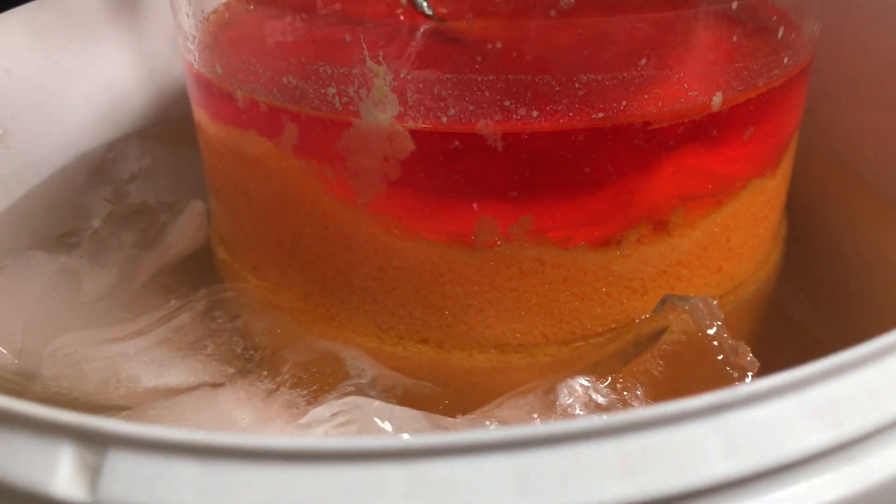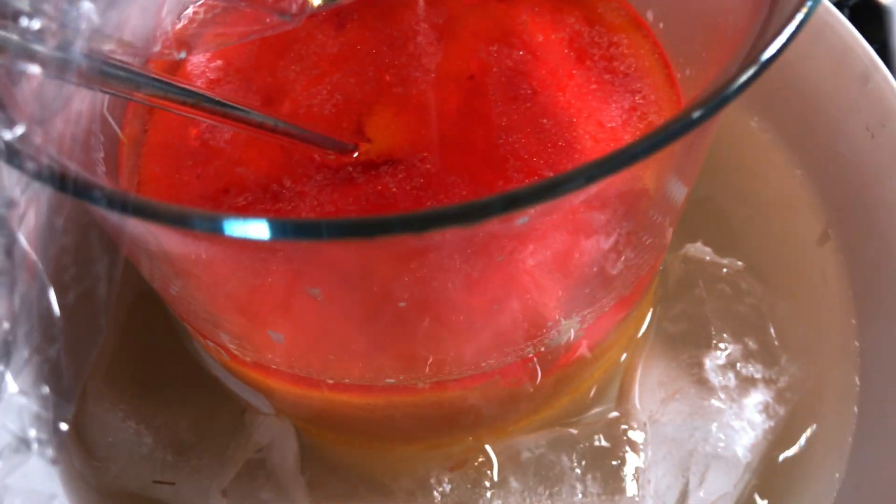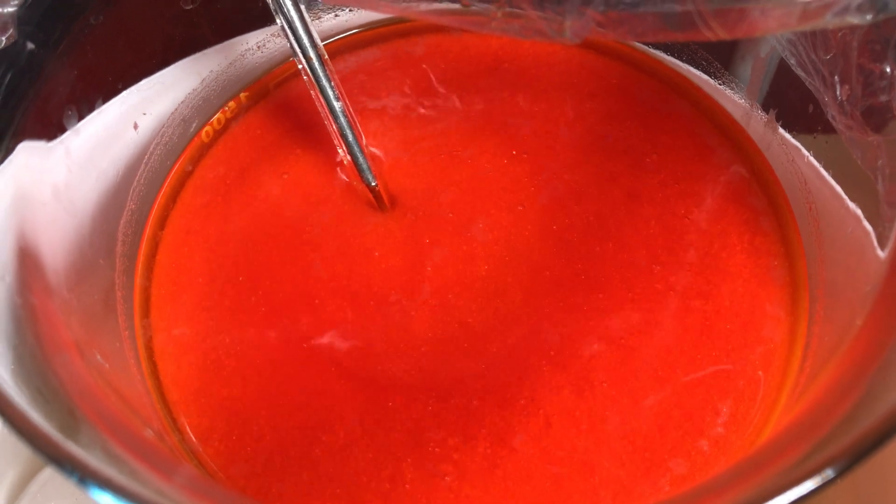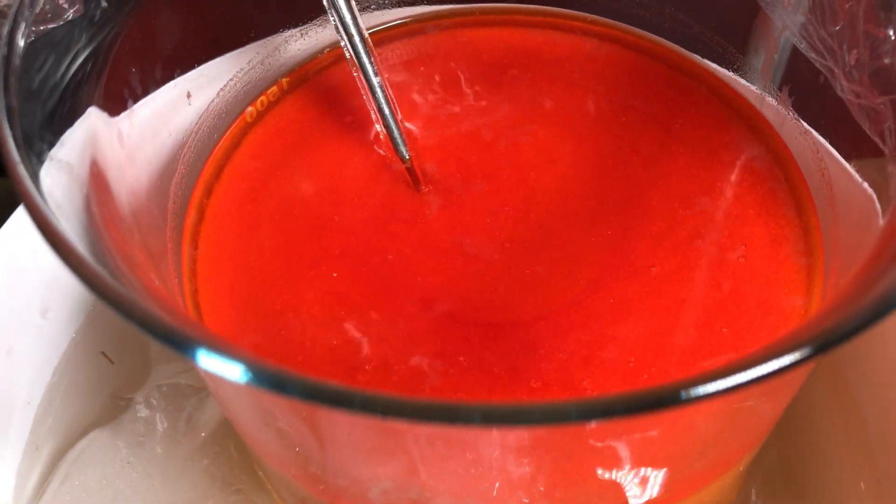After adding the second 250 milliliters of water we got much more. You can see the ice crystals floating around in the second batch of distilled water. As I added it we got more precipitates and it looks somewhat dichromate like. I stirred the solution and afterwards let it sit.